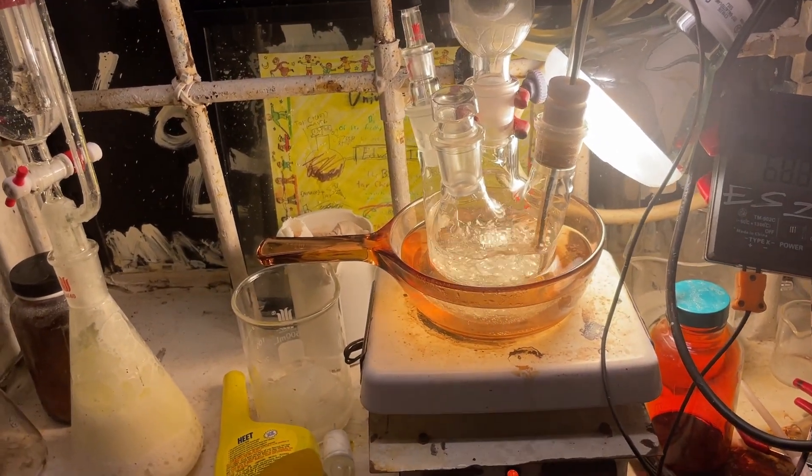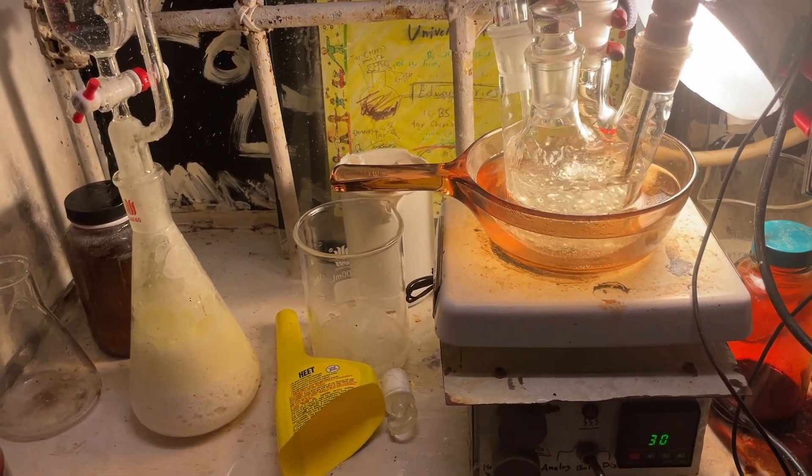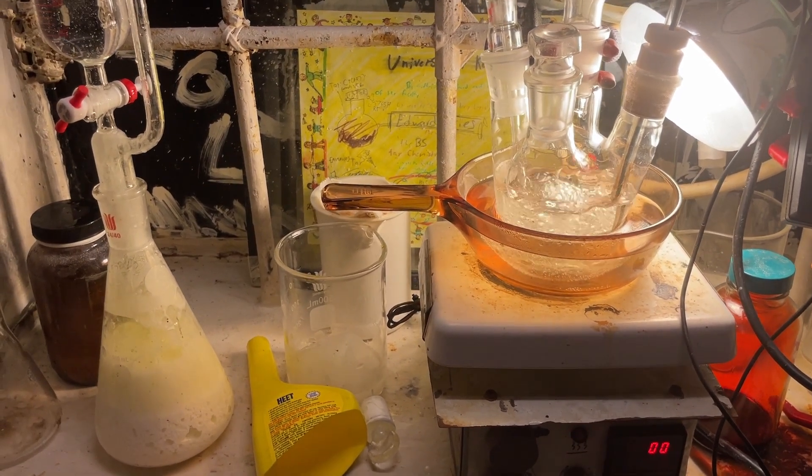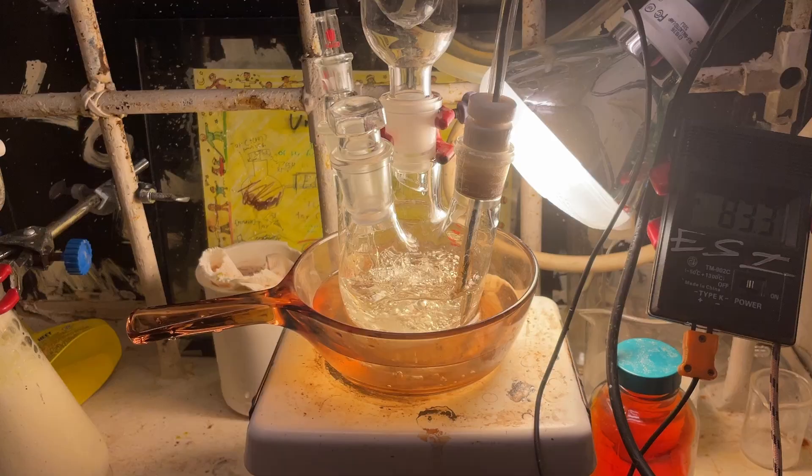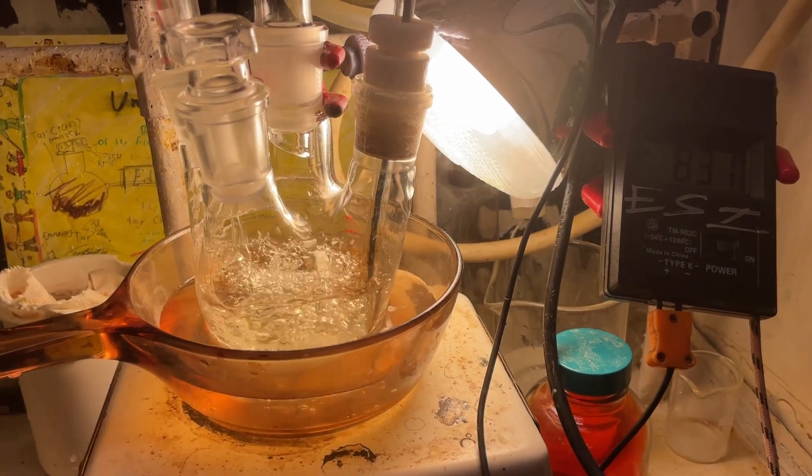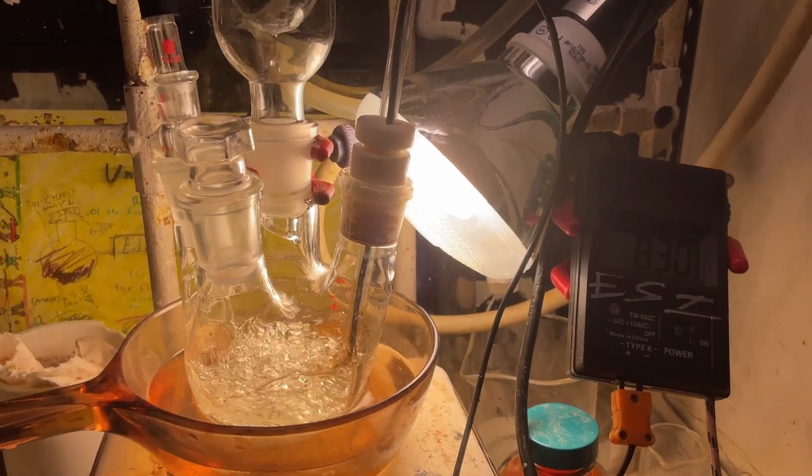We're at 70 Celsius, roughly. And the chlorine's burning quite fast, so once it gets to around 90, I'm gonna let more chlorine in, and that should be done. Okay, the reaction's at 83 Celsius now, so that's almost done, because the goal for this is actually 90. Nice.